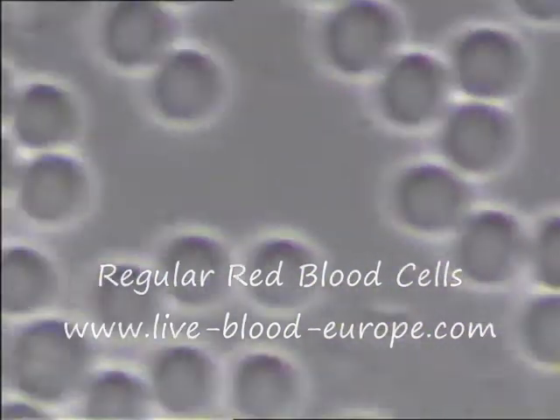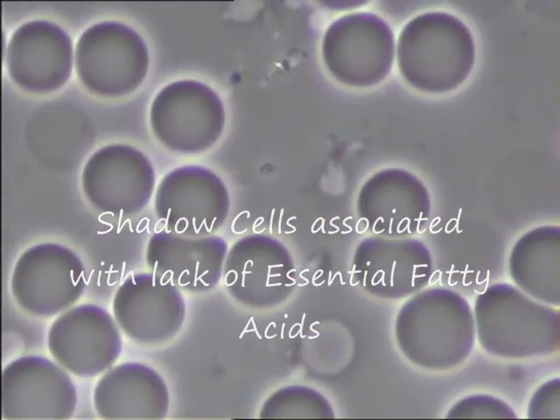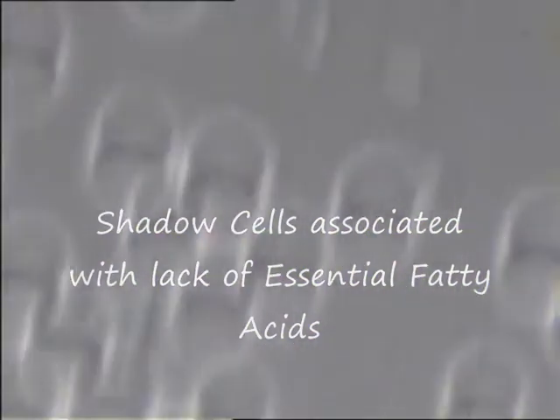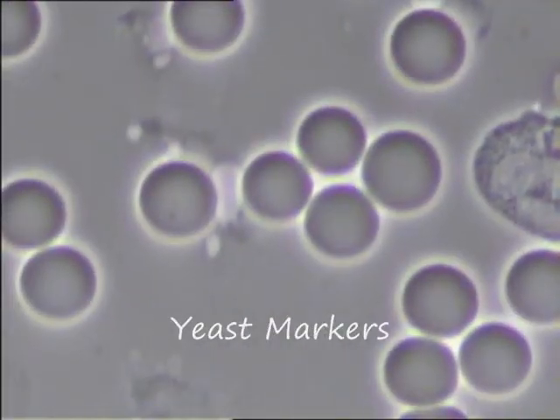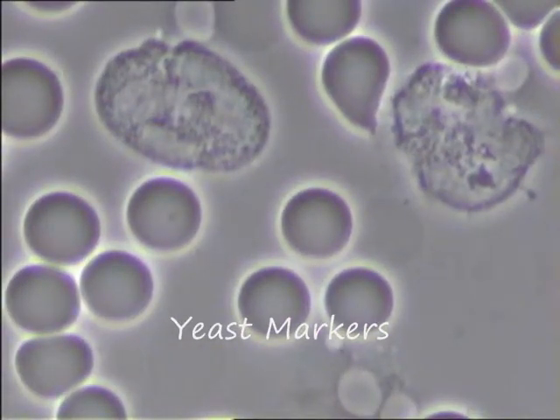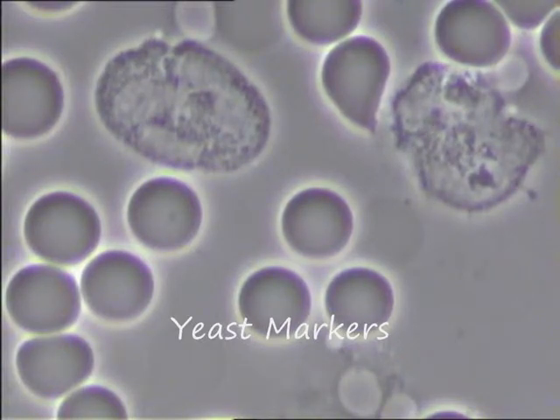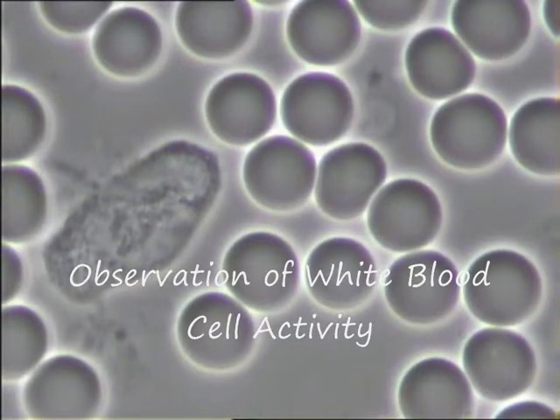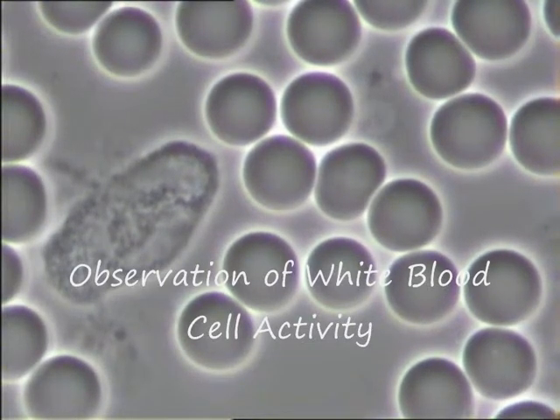Most of the red blood cells are actually in the right sort of size and shape. You can also notice some cells that are grayish, meaning they don't have a shiny membrane and they're lacking some healthy oils.